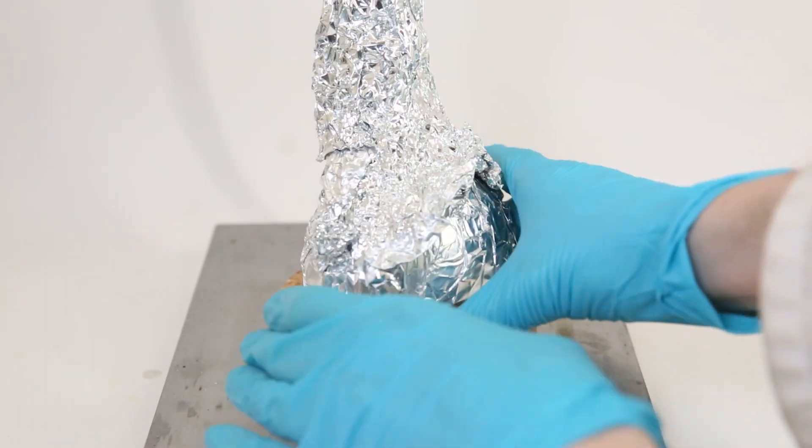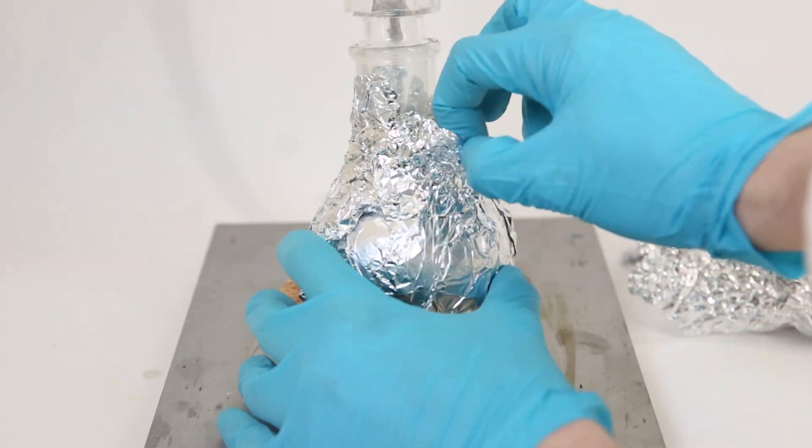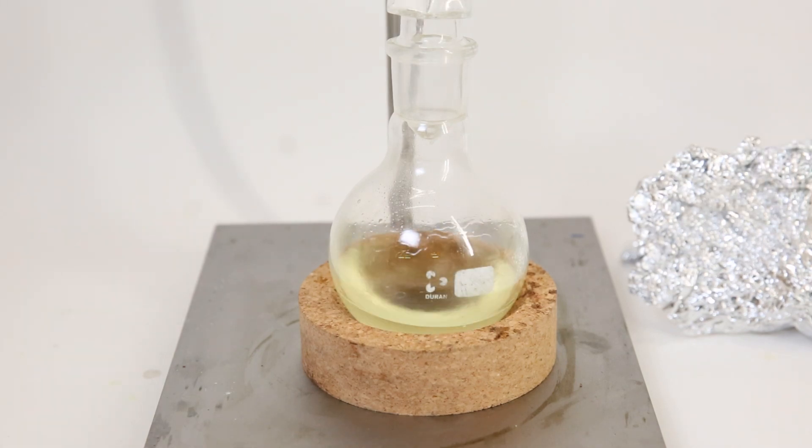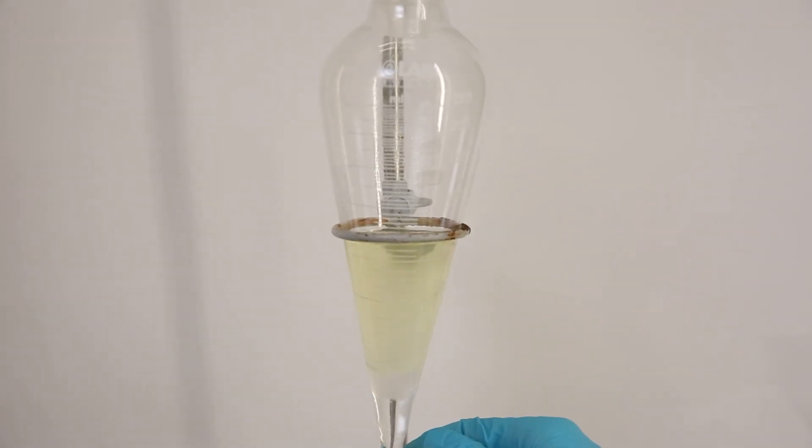After cleaning it all up, I combined all the liquid from the small flasks into a larger flask and I am left with a yellow liquid. Because there is water present with the Acrolein, I put all the contents into a separatory funnel and separate the layers.